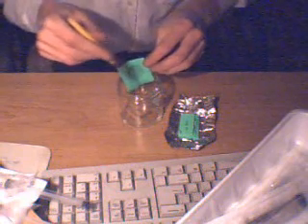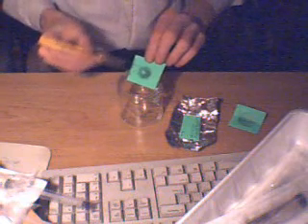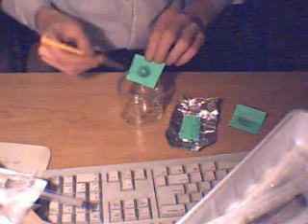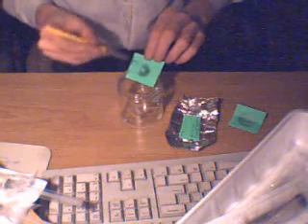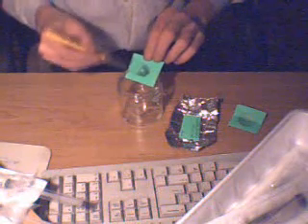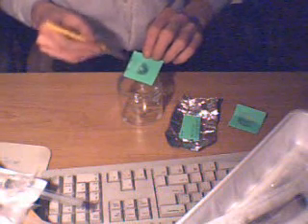Continue with the remaining prints using approximately two per syringe. The spore prints I'm using are the granddaughters of the spore syringe I originally purchased over the counter locally. The spore print paper I use is green because there is no such thing as a green spore — this allows me to make prints of other species of spores outside of the psilocybin family.